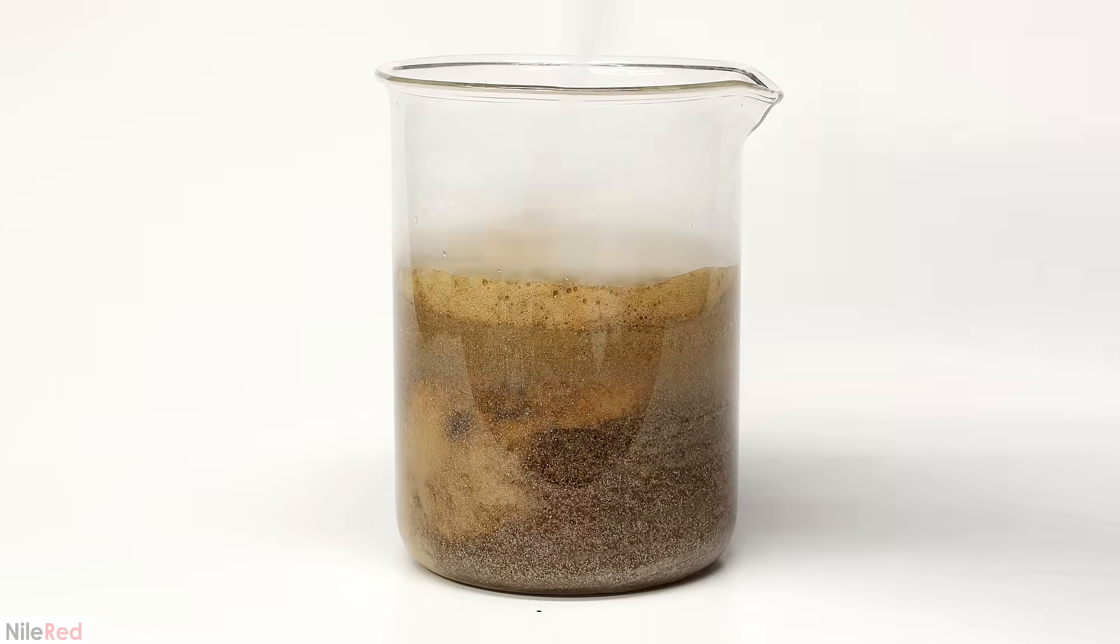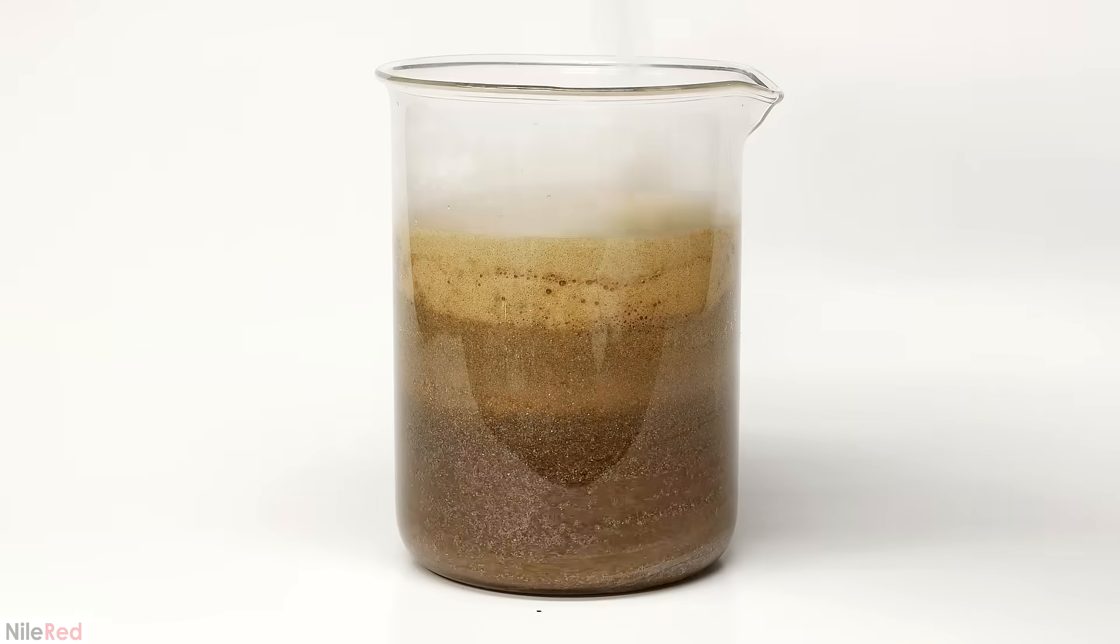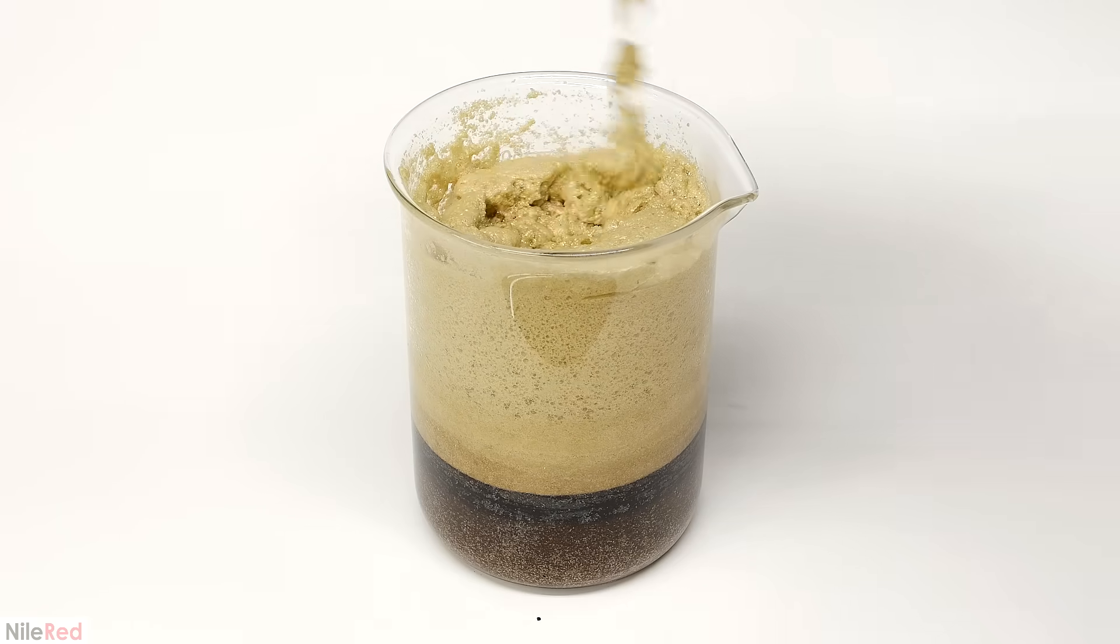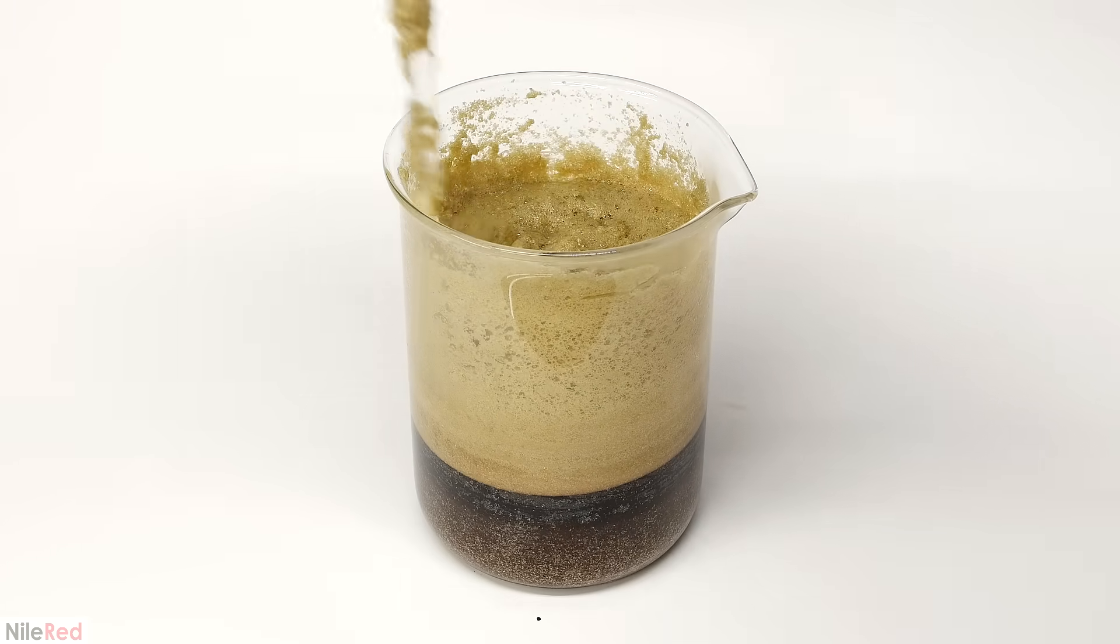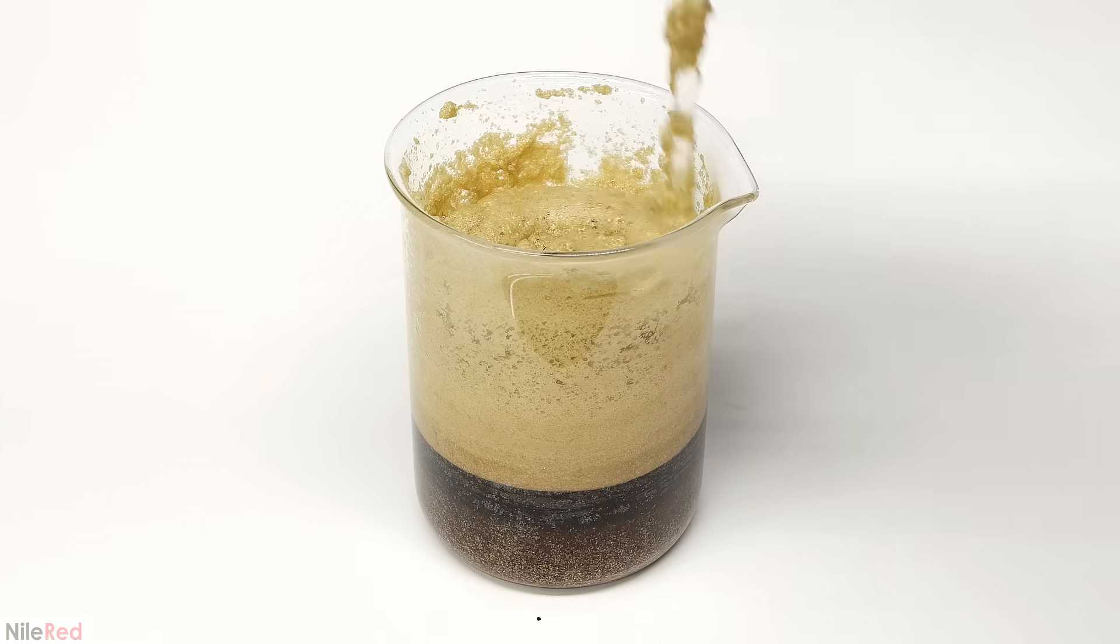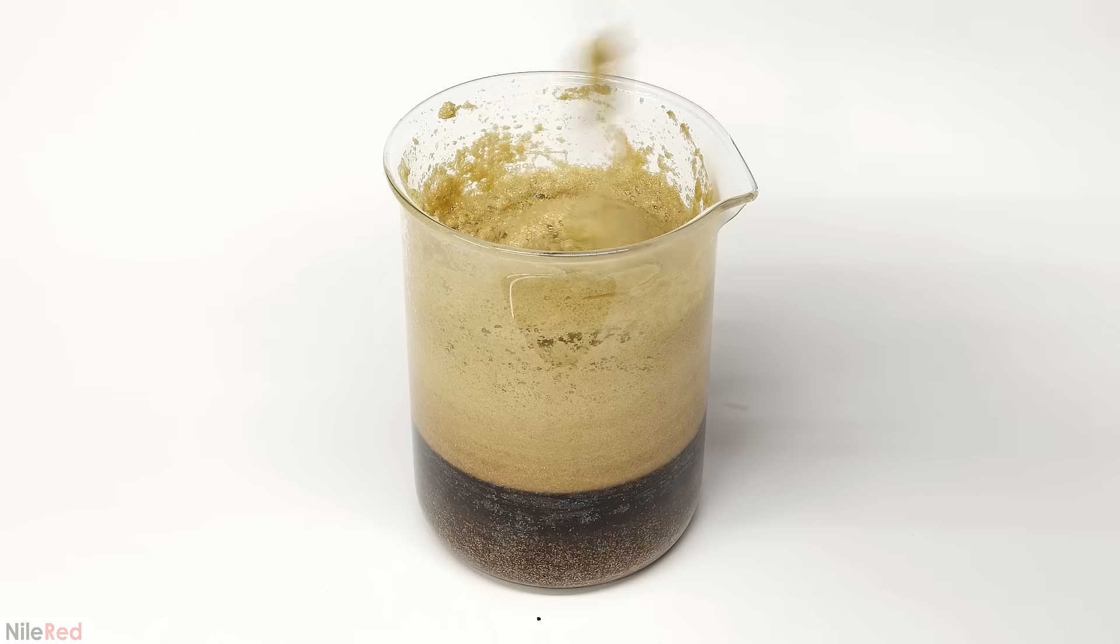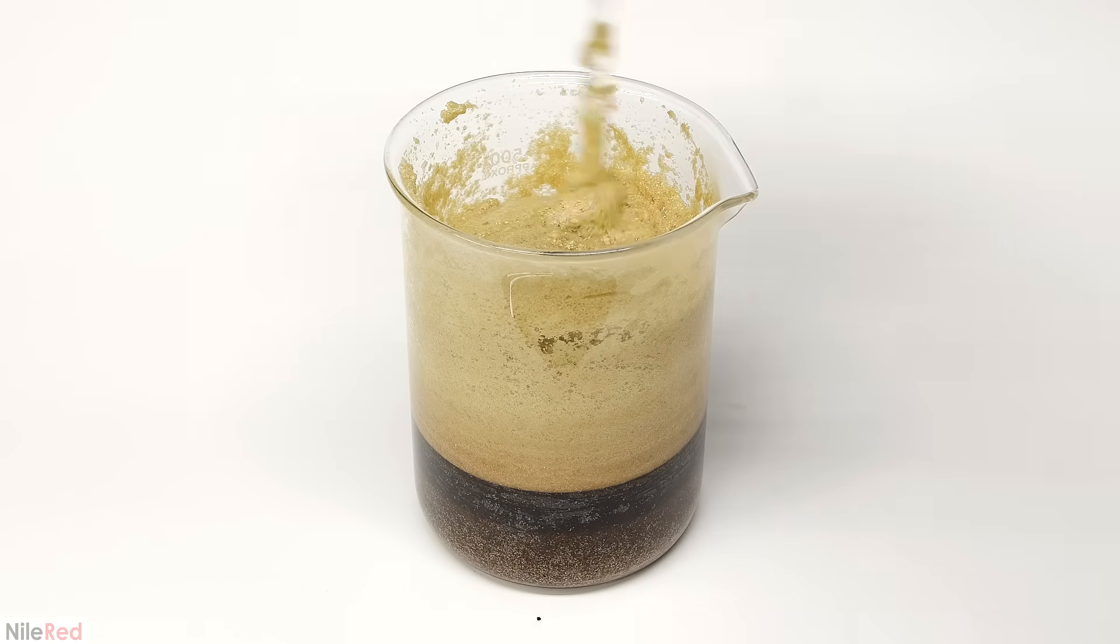So, it ends up being a dirty brown color instead. It also puffs up a little and makes some nice and appetizing pee foam. This is probably the major thing to look out for with this reaction, because if it ends up overflowing, it's not gonna be very fun.